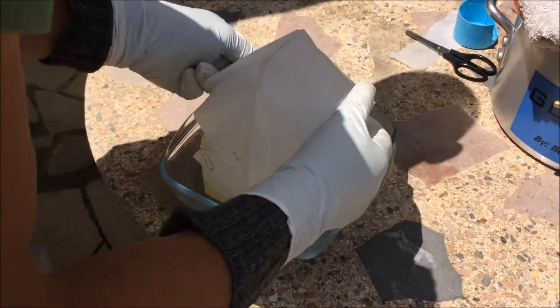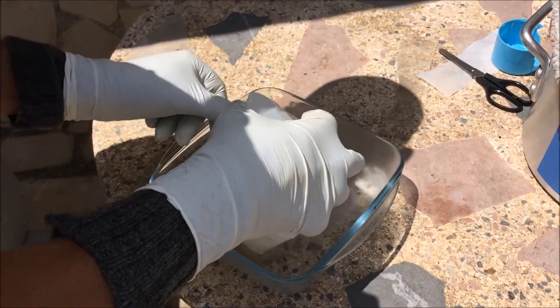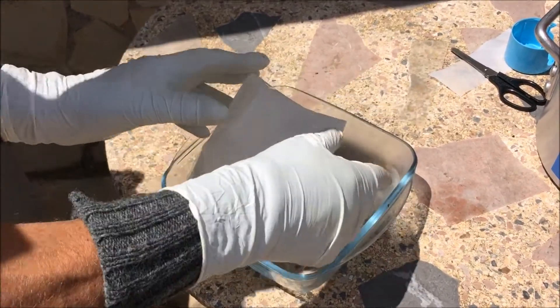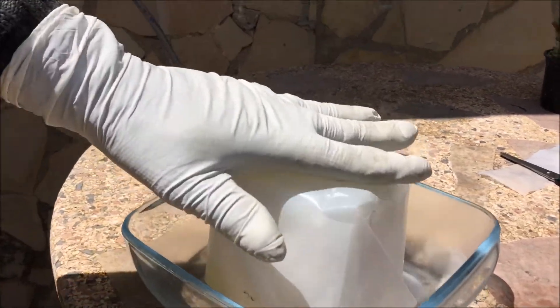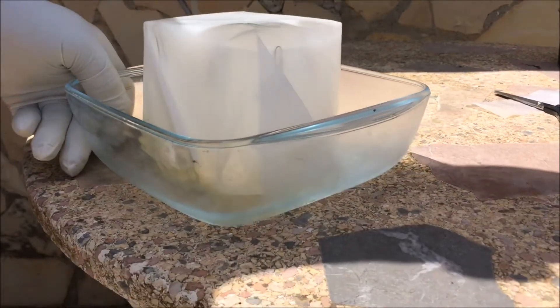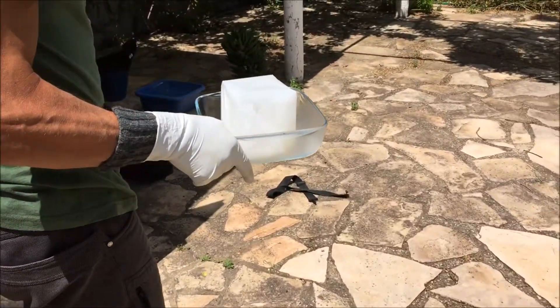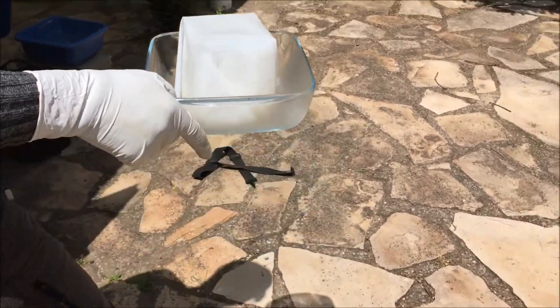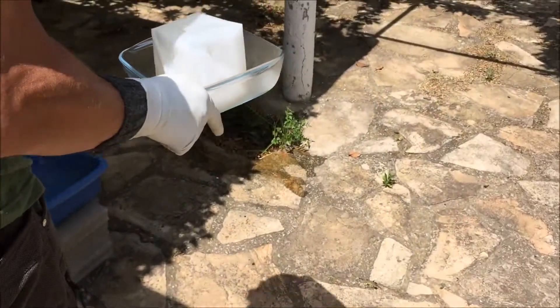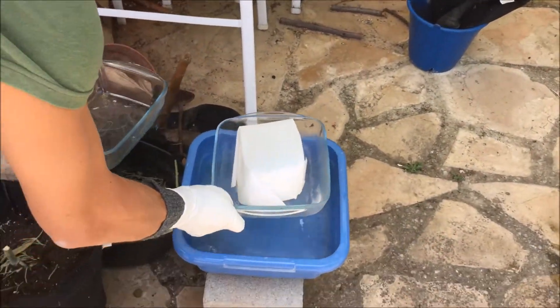Now you will see how to use the PTFE during purging. Right after the extraction, we have closed off the PTFE box containing the oil with a PTFE cap. This closed box we can heat up with warm water of about 30 degrees Celsius. We put the box in a Pyrex bowl and make it float in the water. Like this, the DME will be evaporated in about 40 minutes. You can add warm water to maintain the temperature if needed.